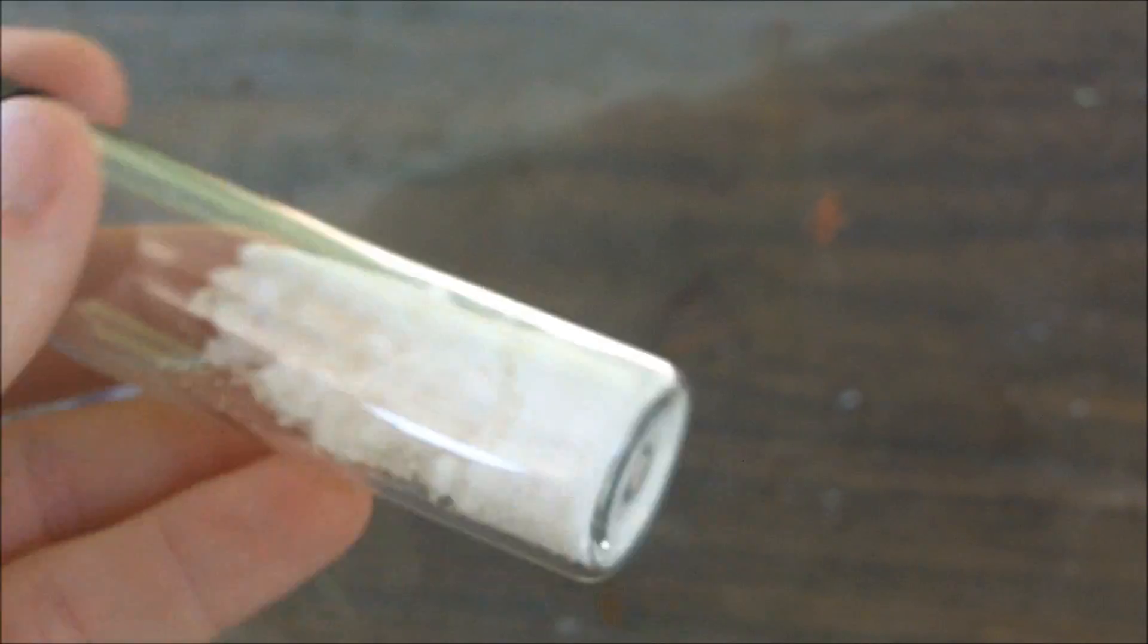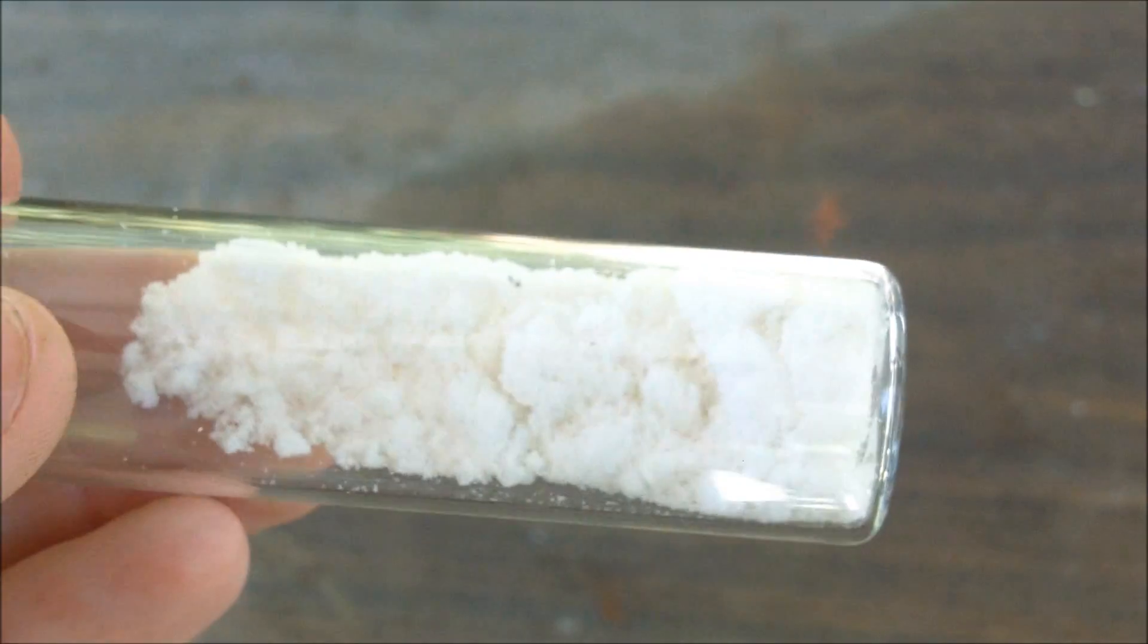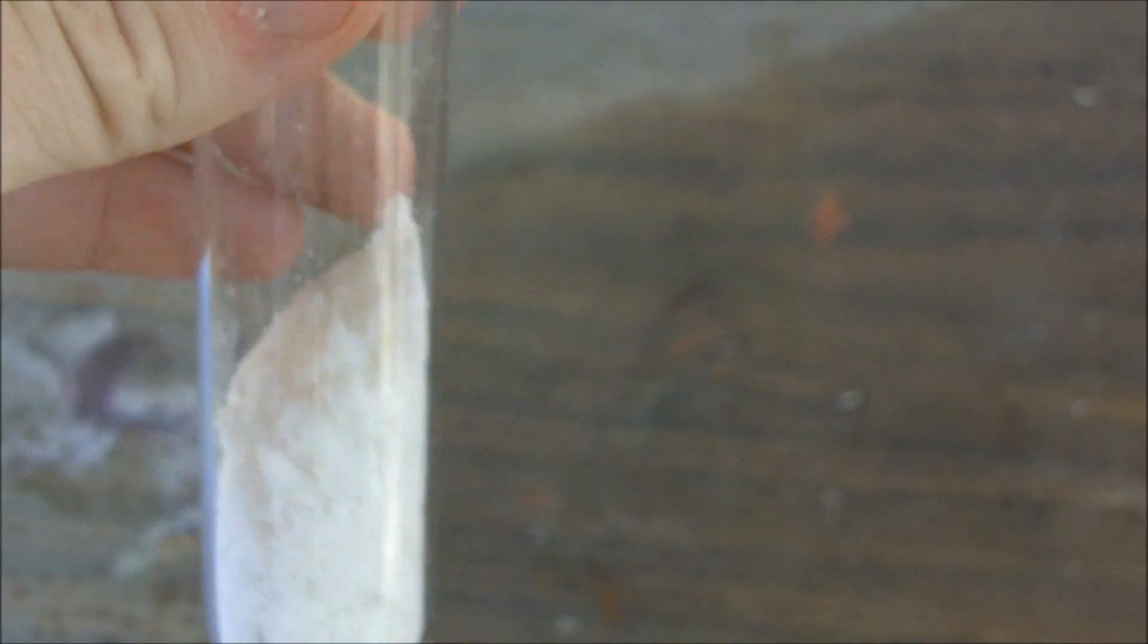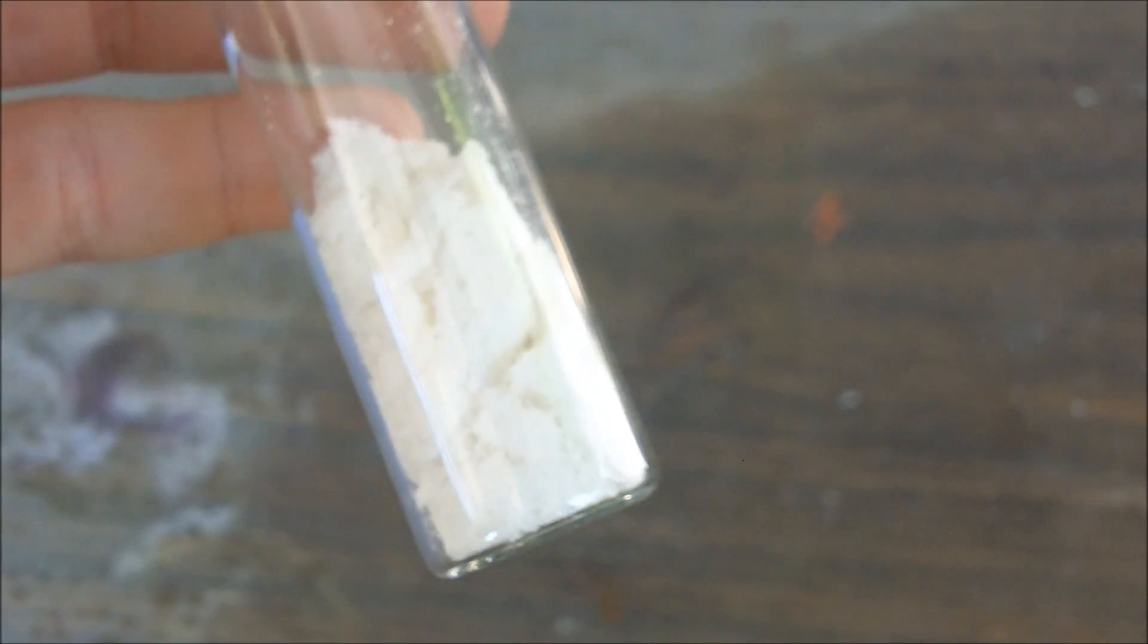Okay, so here is my yield of hydrazine sulfate. About 2 grams. There you are, hydrazine sulfate.